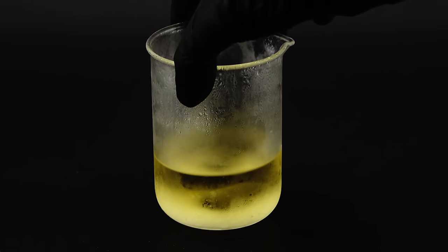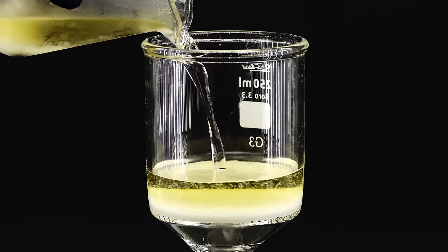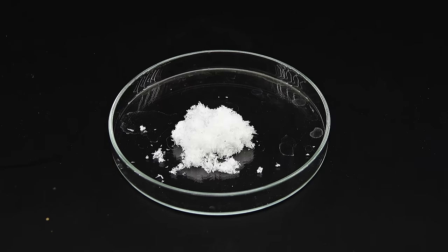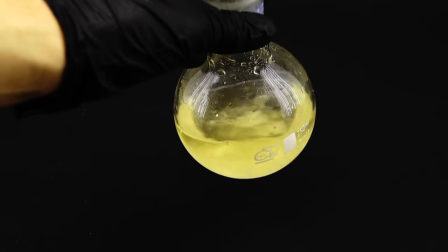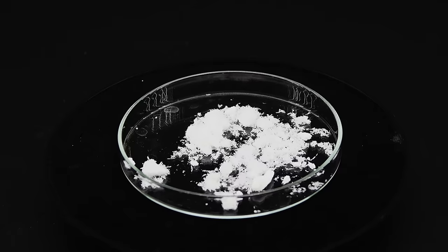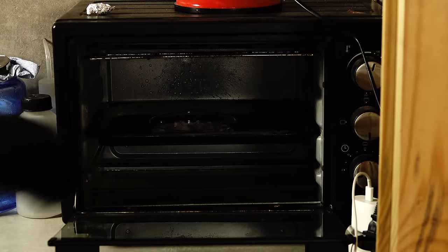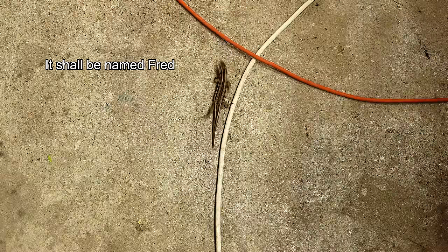In the morning, there was a small layer of beautiful needle-like crystals on the bottom of the beaker. To get rid of the sulfuric acid solution, I used my trusty vacuum filter. I then got the moist crystals onto a dish, and there was a really small amount of them, meaning that this whole process is trash or that I screwed up somewhere, which is honestly highly likely. Anyway, it's now time to dry my product. Before doing that, I noticed that some more crystals of it decided to magically appear in the filtrate. I filtered them out and combined with the rest, which made my yield a bit less terrible. I then dried everything in my lab oven and meanwhile got visited by this really cool lizard I just had to include in this video.